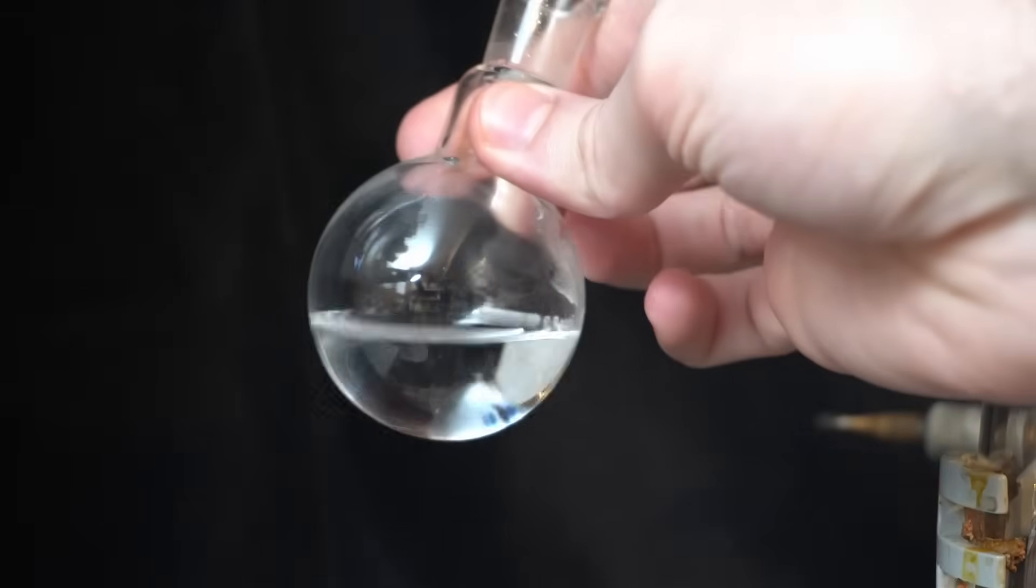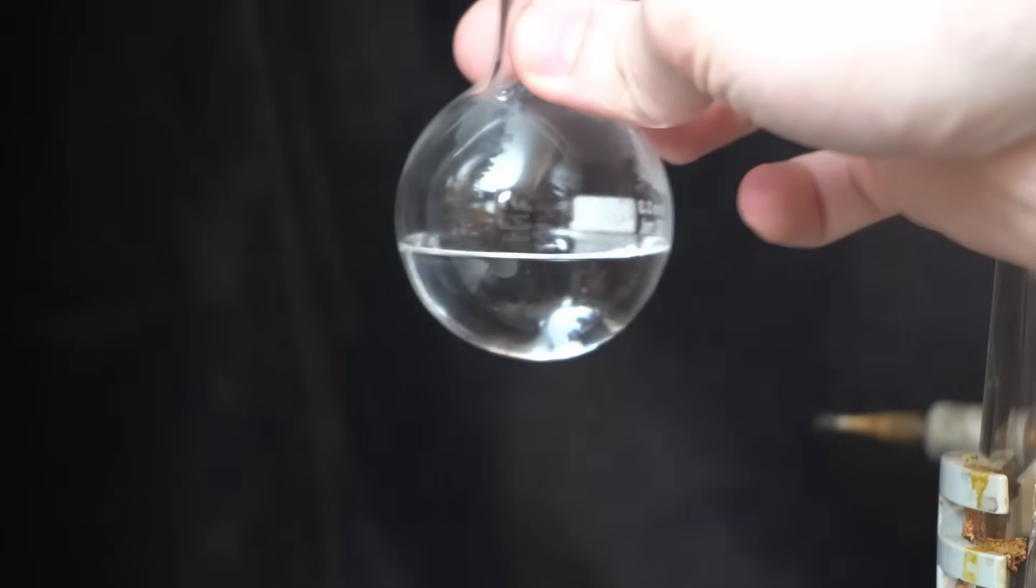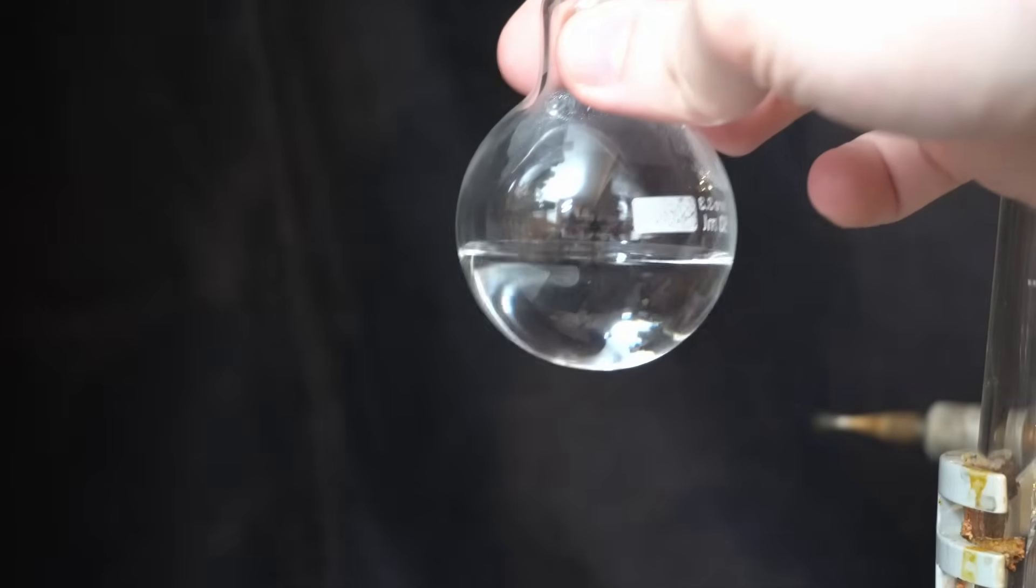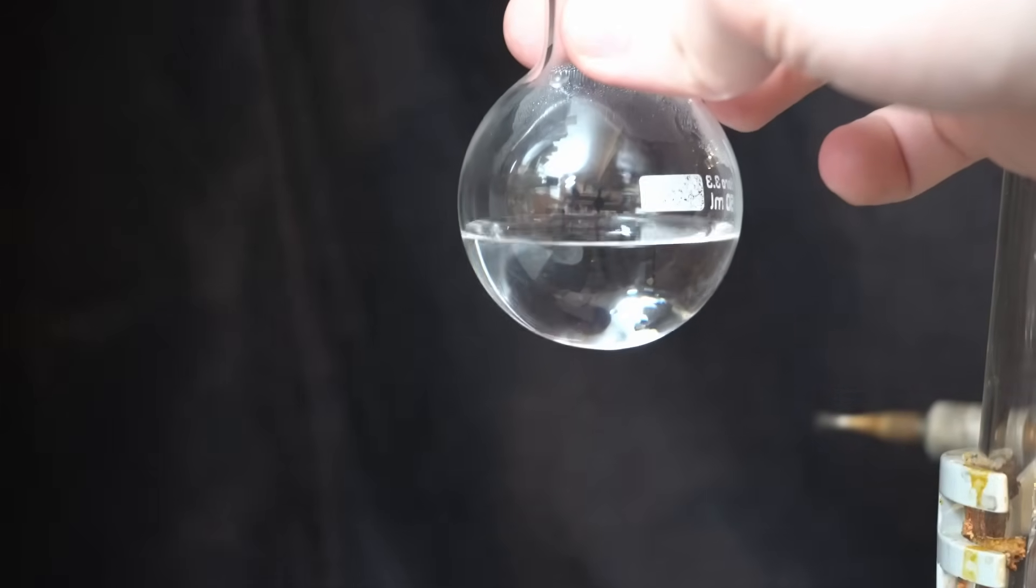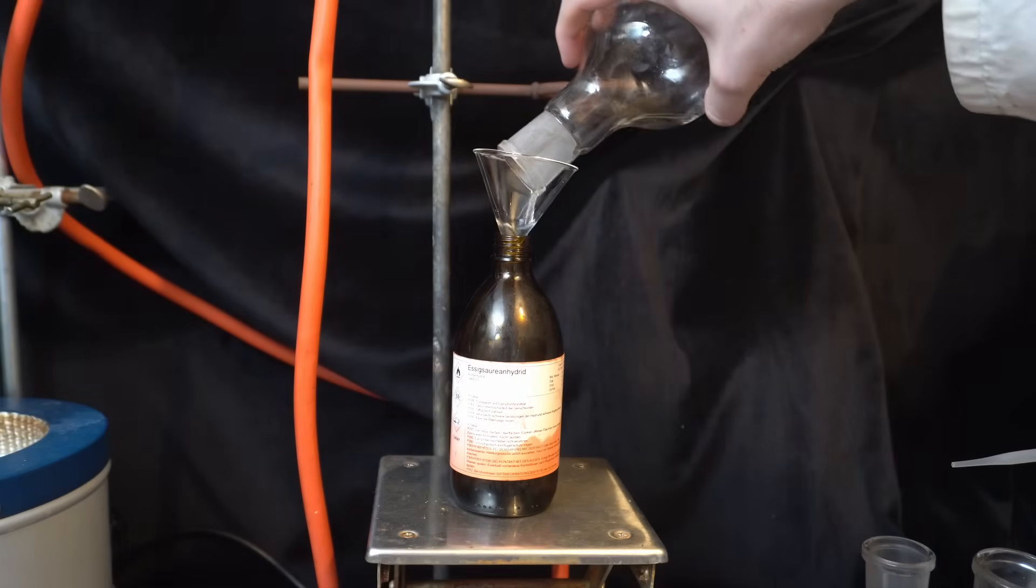After two more distillations, I have refined this fraction to a level of purity I am happy with. It's not quite as pure as the first one, but it's definitely good enough. So now we can combine everything and calculate the final yield.